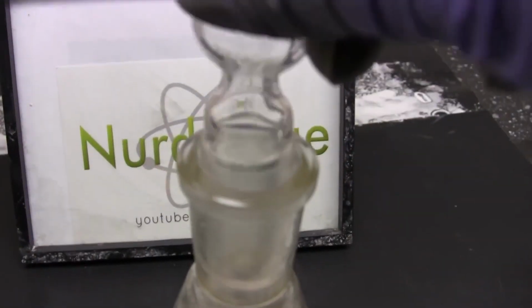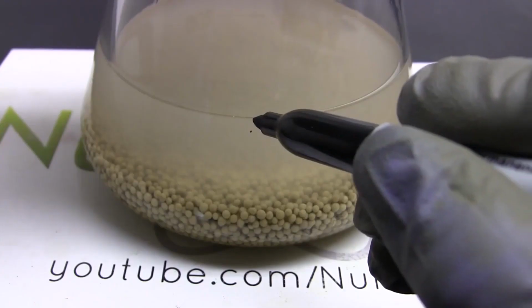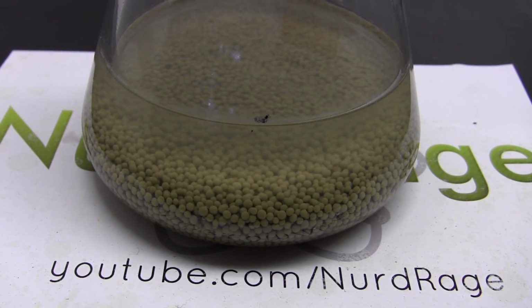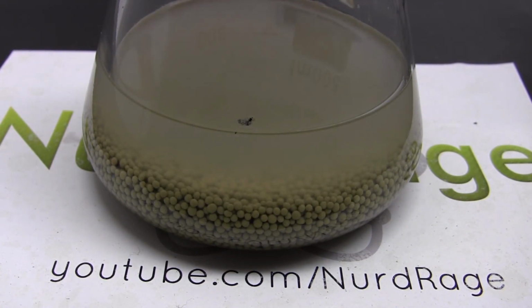Now seal up the flask to prevent the evaporation of the methanol, but more importantly to prevent moisture getting in. Now mark off the starting level of the flask and let it sit for a few days. By pulling the water out of the system, we force the equilibrium toward the formation of sodium methoxide. As this happens, the liquid level will go down as the water is removed. Now when the liquid level stops decreasing over a 24-hour period, we're ready to use a solution of water-free sodium methoxide and methanol.